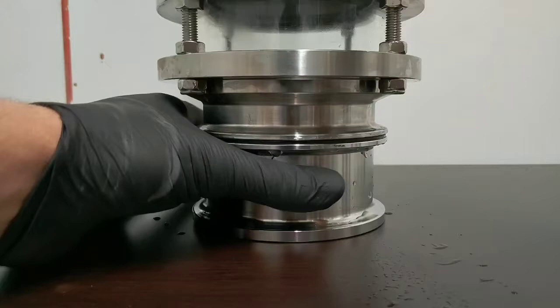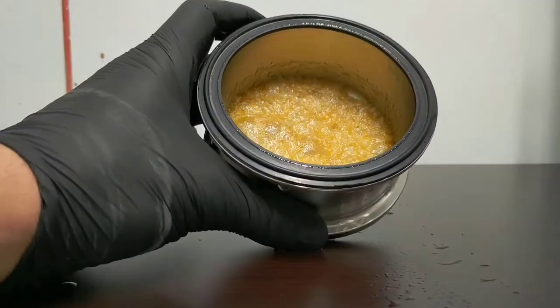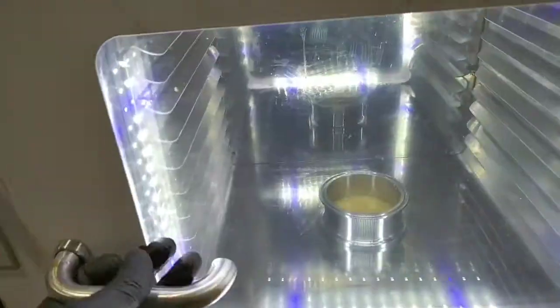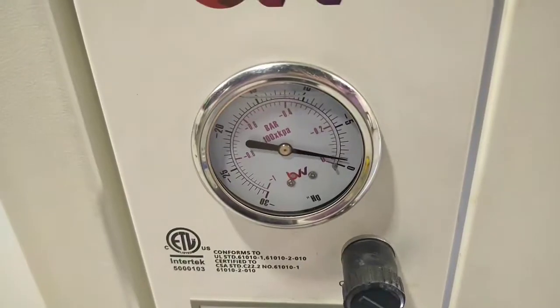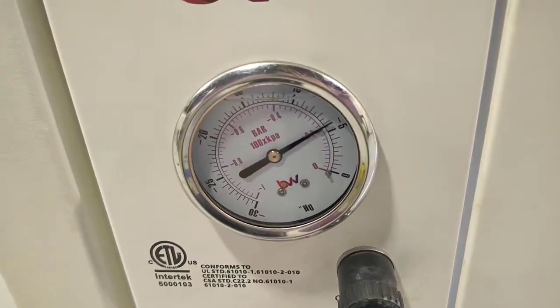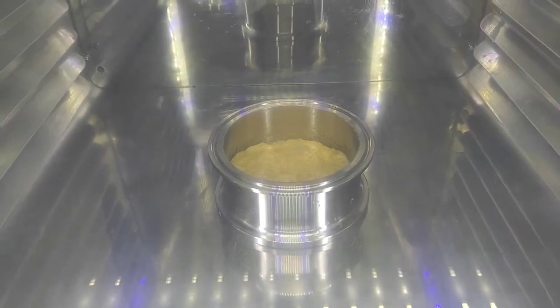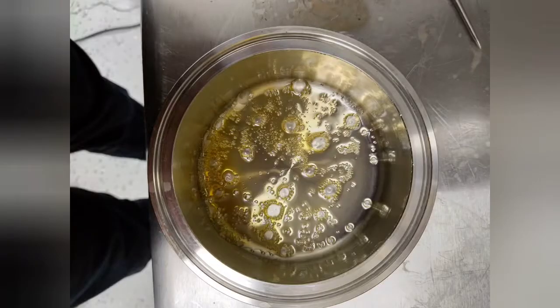Now you can remove the high-pressure clamp and proceed to purge the extract of residual solvent. Take the extract, place it in a vacuum oven, and apply light heat and vacuum until no more boiling is observed and extract consistency stabilizes. Then you can harvest your extract.